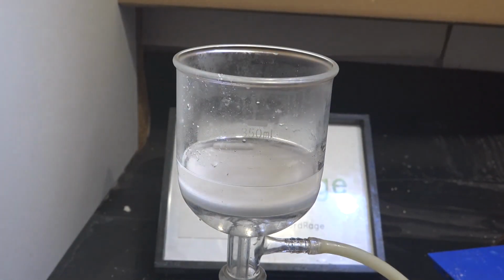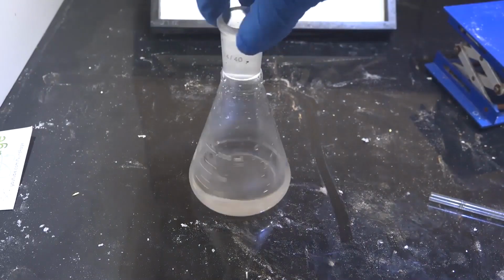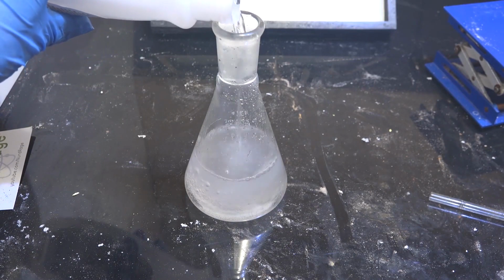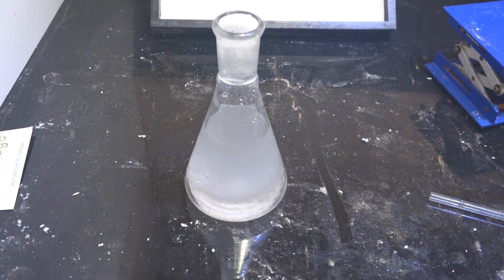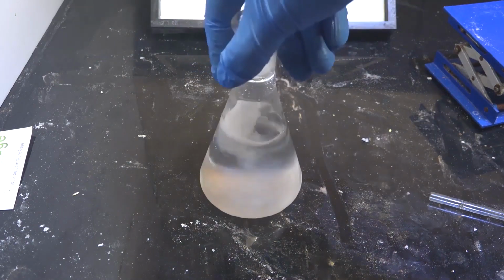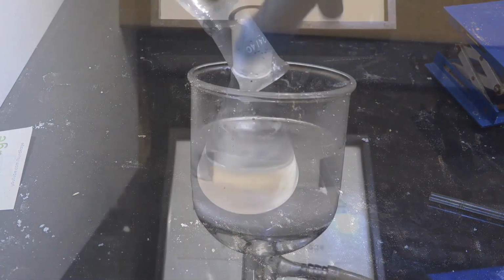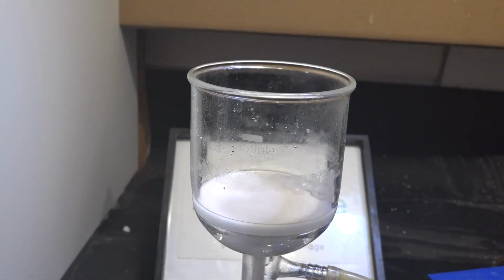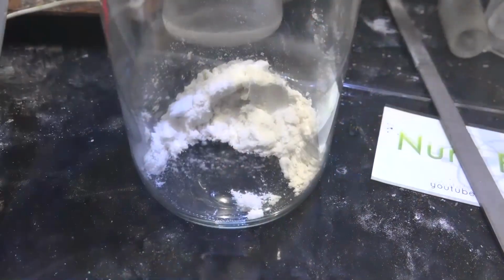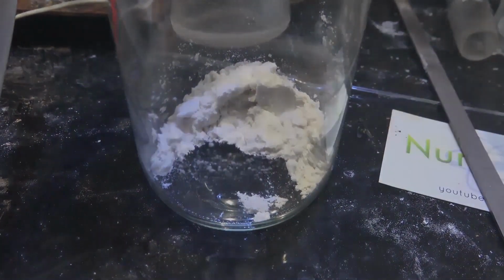This converts the guanidine carbonate into guanidine hydrochloride, which is highly soluble. Anyway, once everything is dissolved, turn on the vacuum and filter the solution through. Now we have our solution of guanidinium chloride. I wanted to precipitate it back out with more acetone, but it turns out it's extremely soluble even in a mixture of acetone and water. Nonetheless, the acetone does help us remove more of the additives, because some of them will congeal into some type of slime as seen here. So we filter it out again to get our purified solution. Now we vacuum distill the solution to get dry guanidinium chloride. And there it is, guanidinium chloride. The total mass is 15 grams.